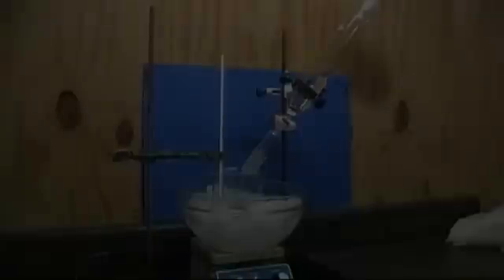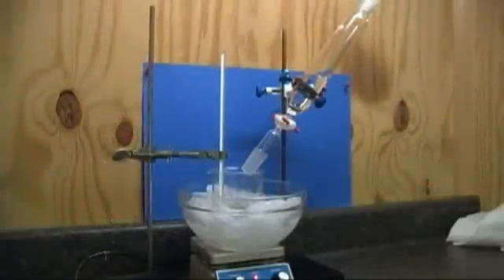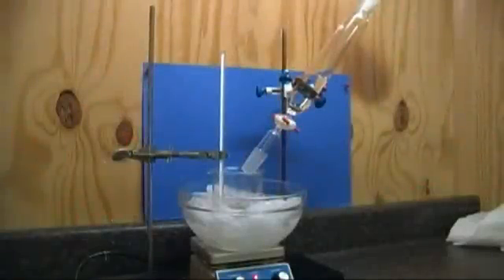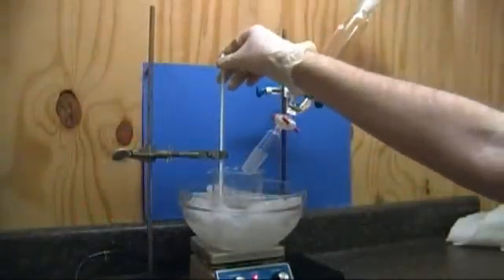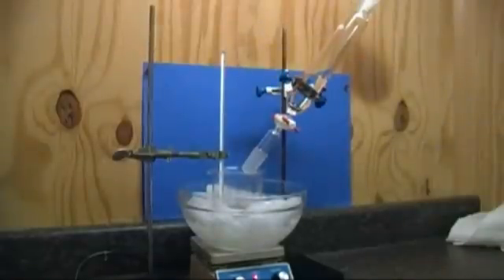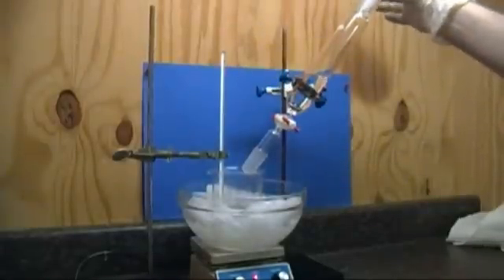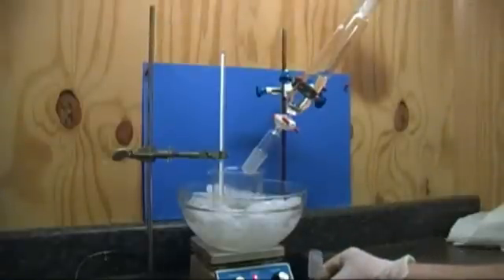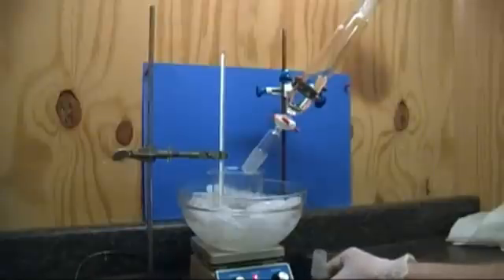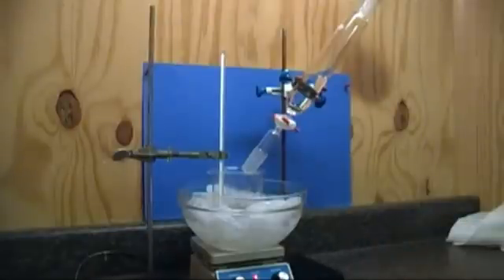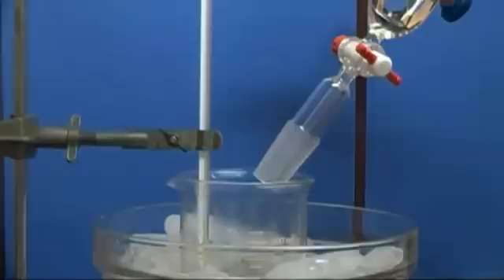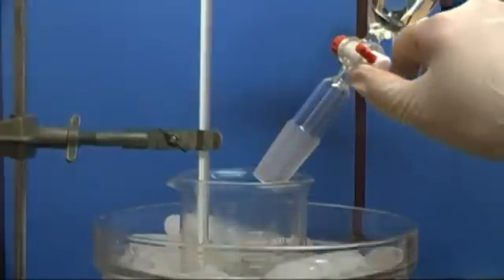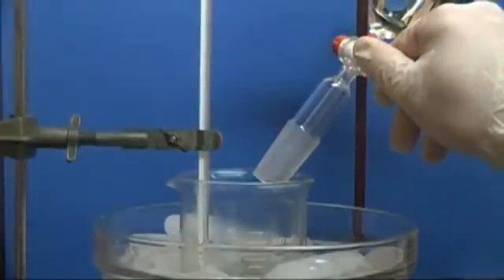Once all the acids are mixed and have cooled down, you can begin to add the benzene. Place 60 milliliters of benzene in a sep funnel and set it up to begin dripping the benzene into the acid. Also add a thermometer to keep track of the temp. We do not want the temperature to exceed 50 degrees C or we will start to get side reactions that we do not want. I set my drip rate so that the temperature did not go over 40 degrees C.